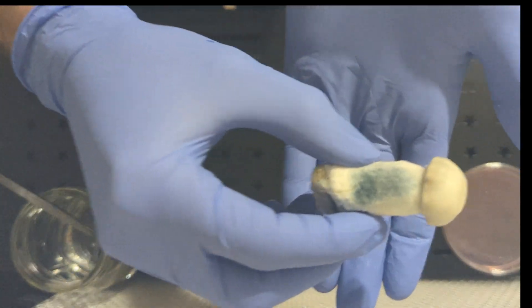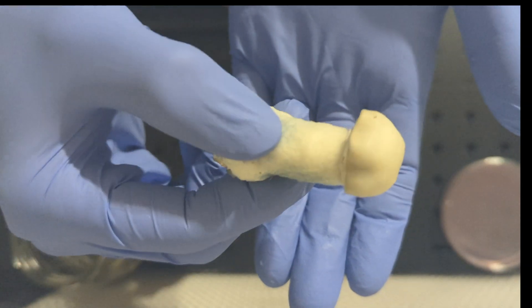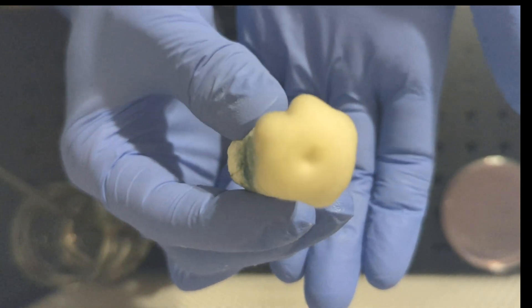You can surface sterilize the mushroom if you want, but the method I'm going to show you, if you have good technique, you won't need to surface sterilize the mushroom.